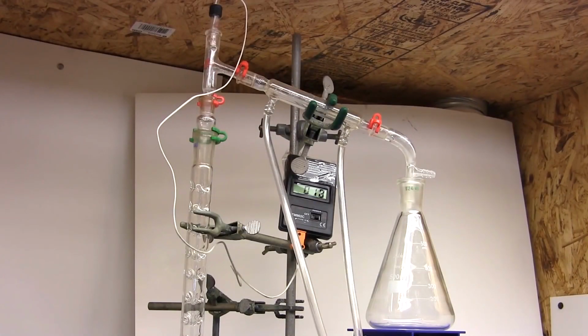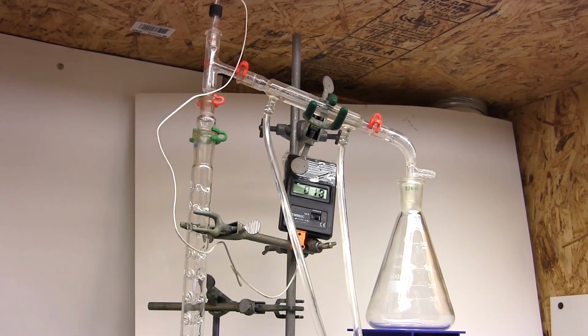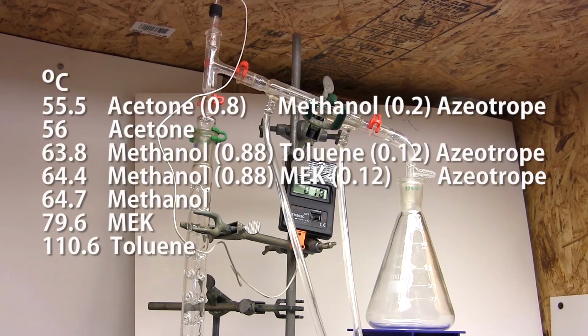So here's our fractional distillation setup. Okay, let's turn on the stirring, the heating, and the cooling water. Now when doing a distillation, it helps to thoroughly research your components and the azeotropes and list them out in a table in order of temperature.